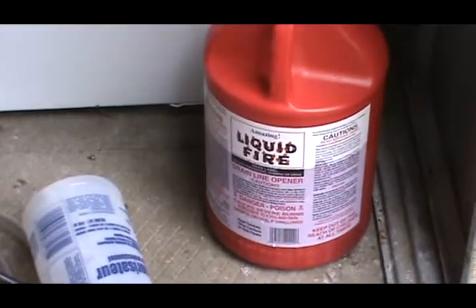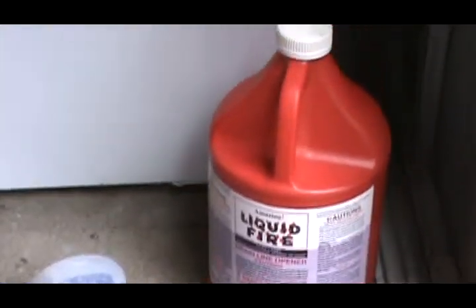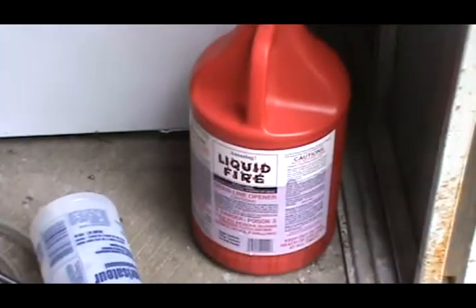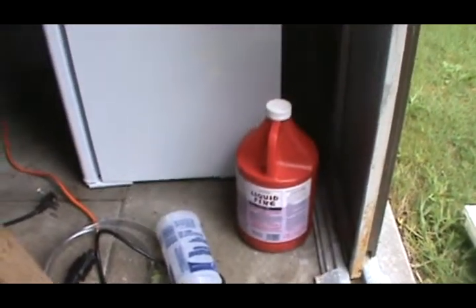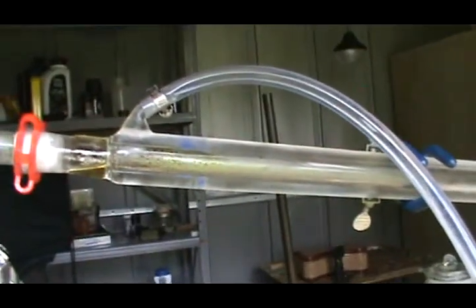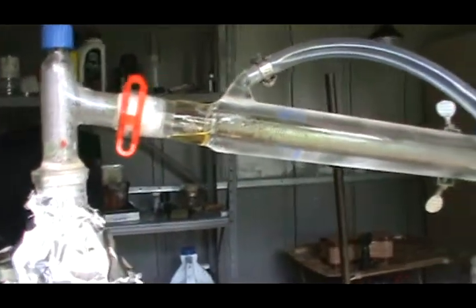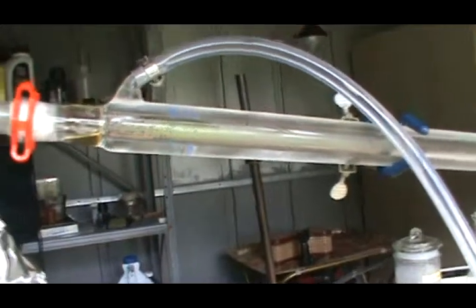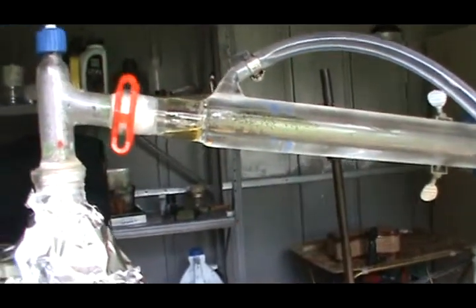That's the brand of sulfuric acid that I'm using. It seems to be working pretty good, but I'm going to try to switch to a different product and see if I can get better results. It's really cleared up now. The acid's starting to clear, get a nice clear tinge.